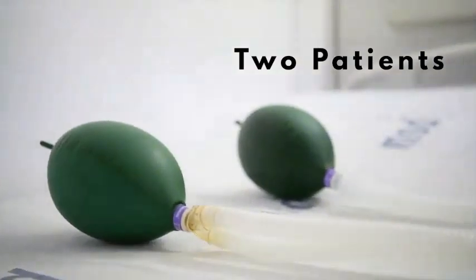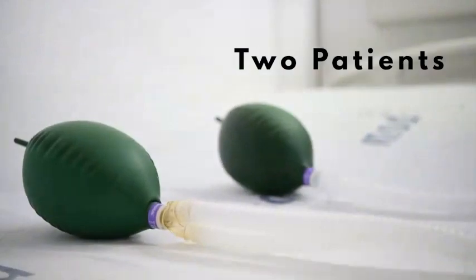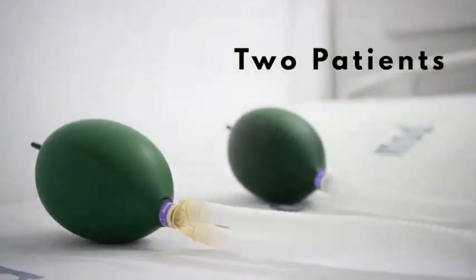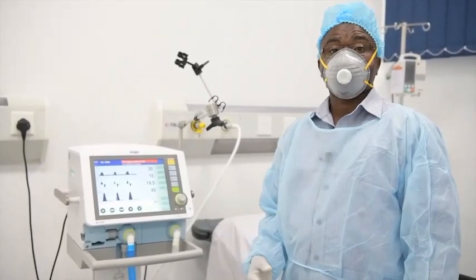So this is how you can connect two patients on one ventilator. But you can also connect four patients, six patients on the same ventilator.